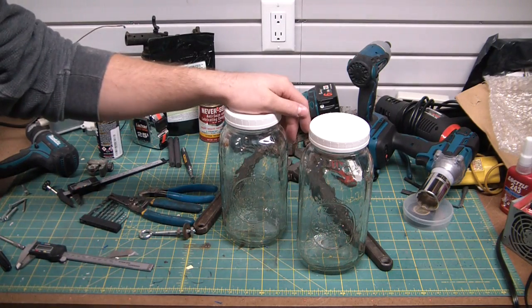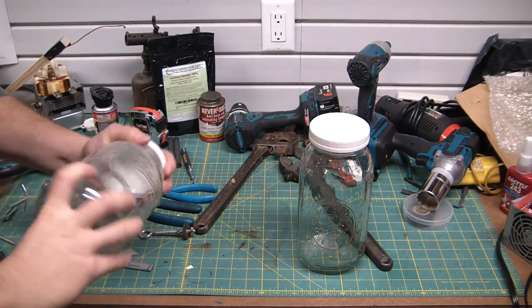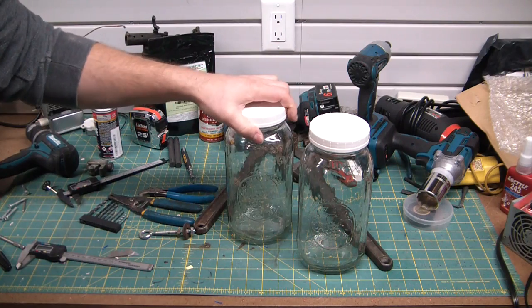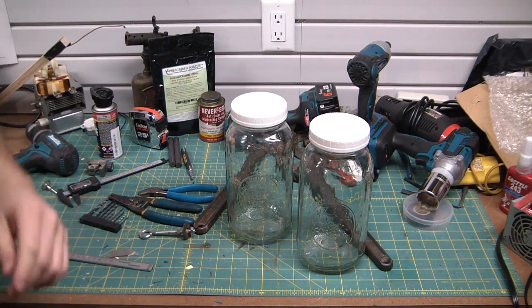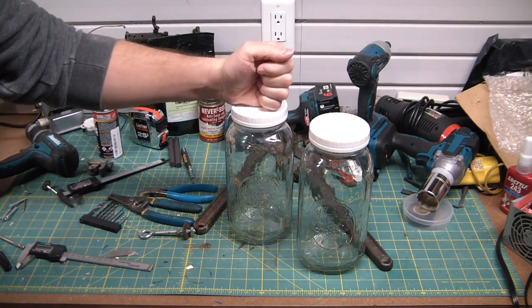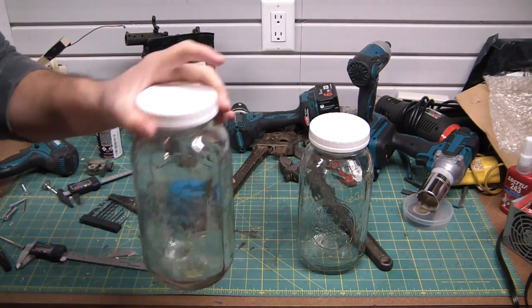Hey, what's going on guys? Welcome back to the Elemental Maker. Today we are going to be making a couple quick and dirty chlorate cells out of some old Mason jars here with some fancy new plastic Walmart lids.